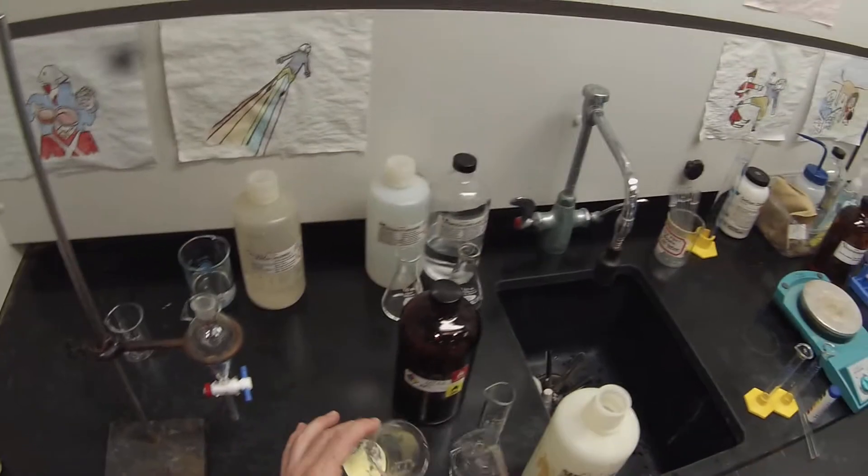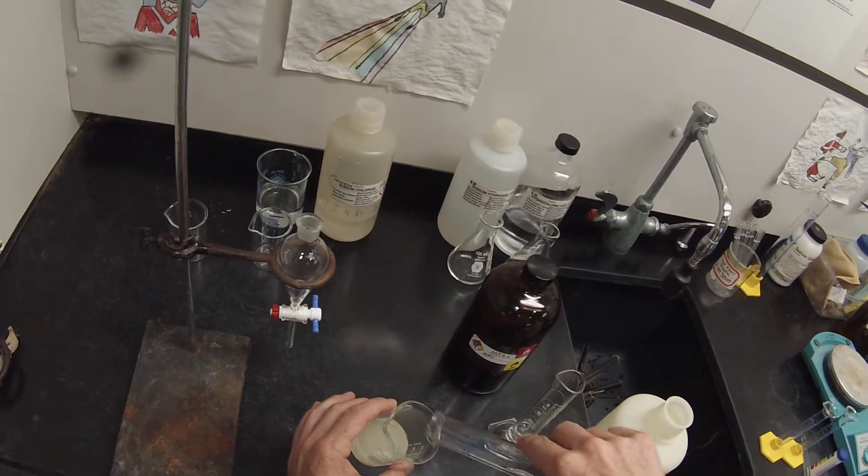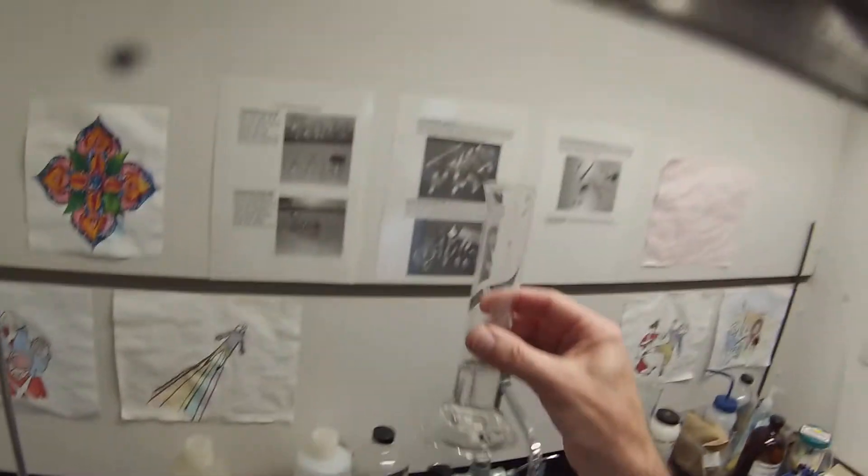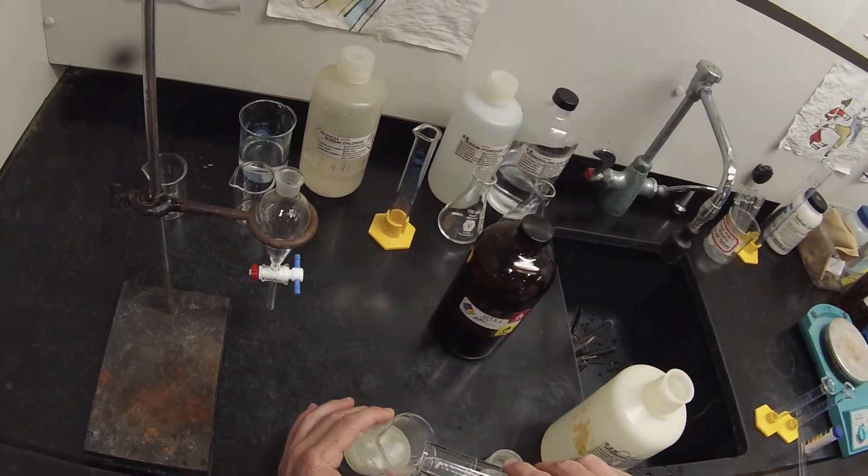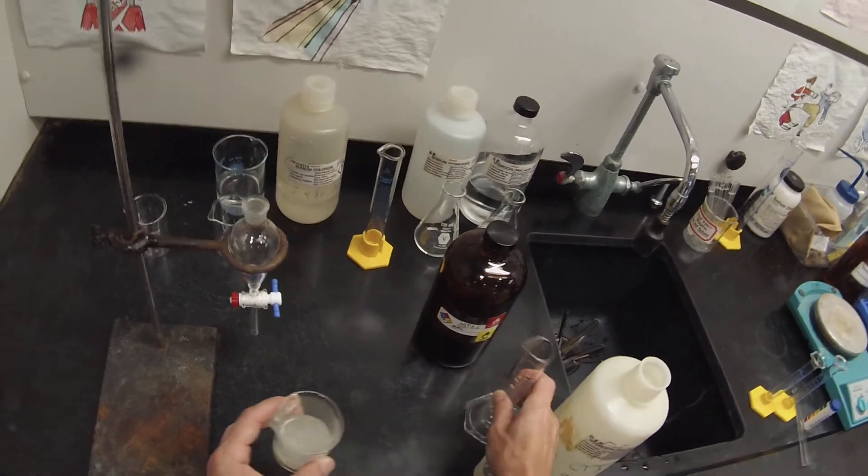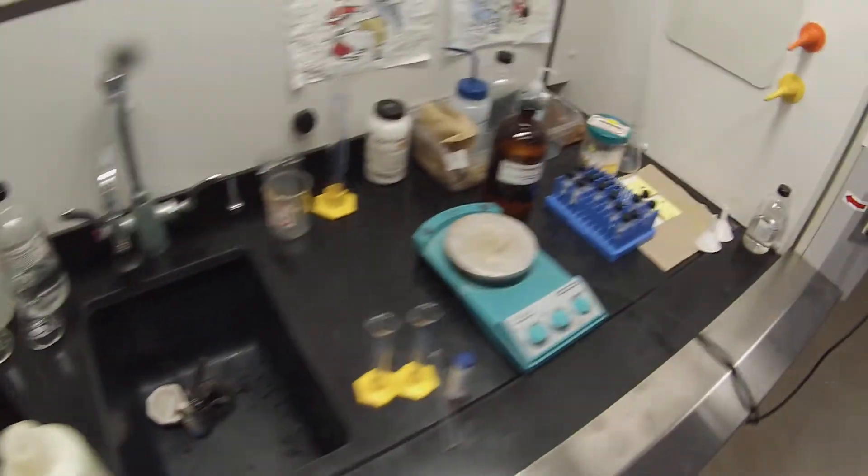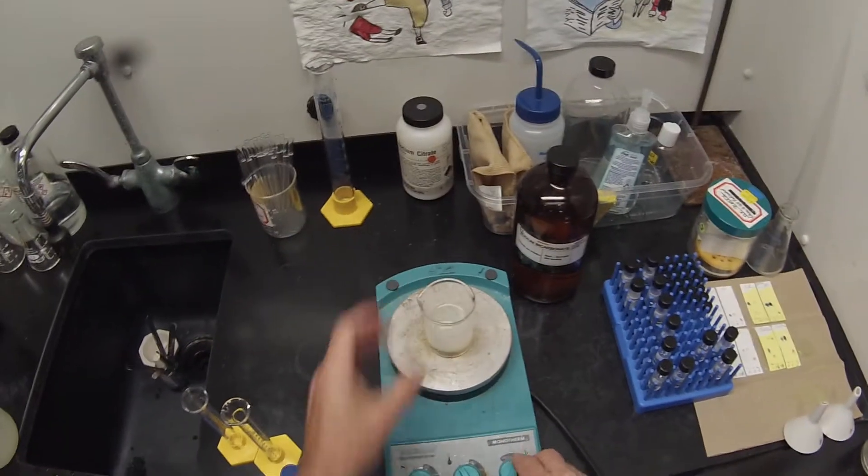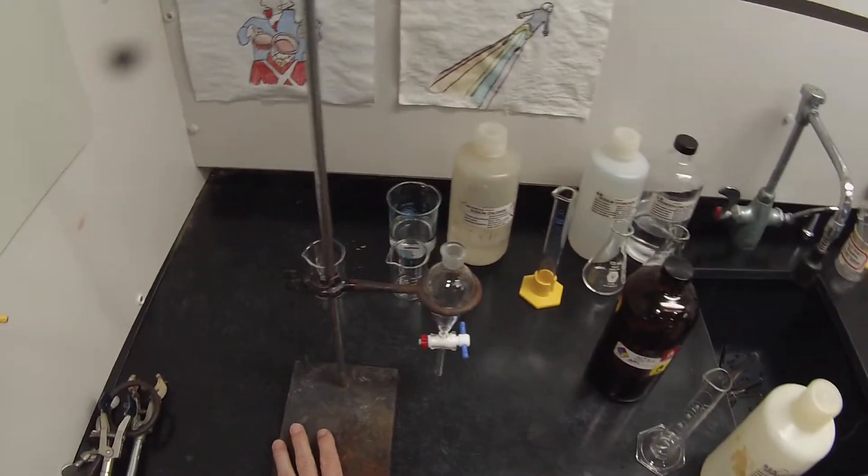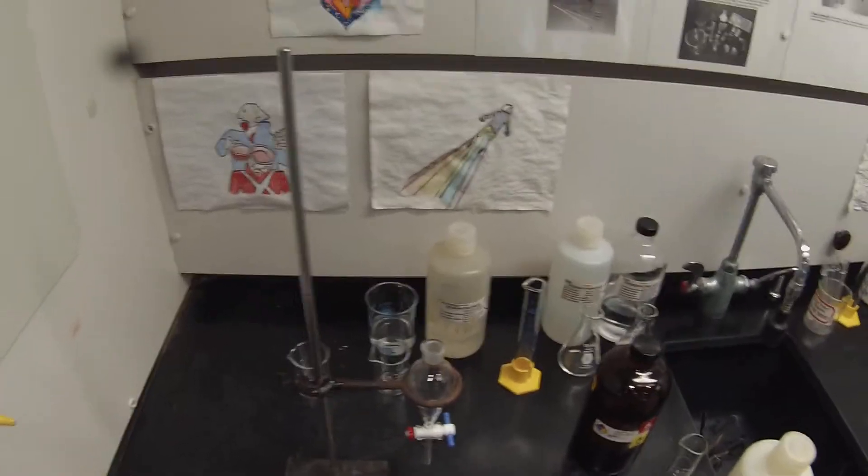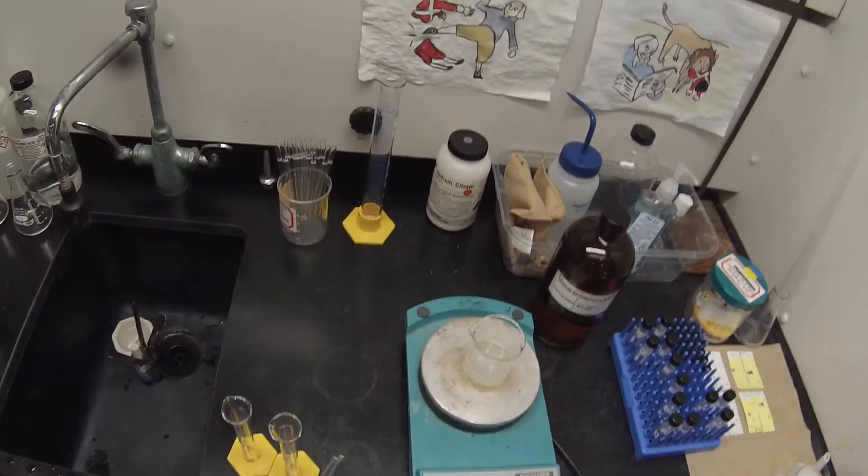We're going to add our 30 milliliters of MTBE, our organic solvent, and 15 milliliters of 0.5 molar hydrochloric acid. We're going to stick a stir bar in there, the smaller stir bar, and stir that at about 300 RPM to try to get all or almost all of that to go into solution.